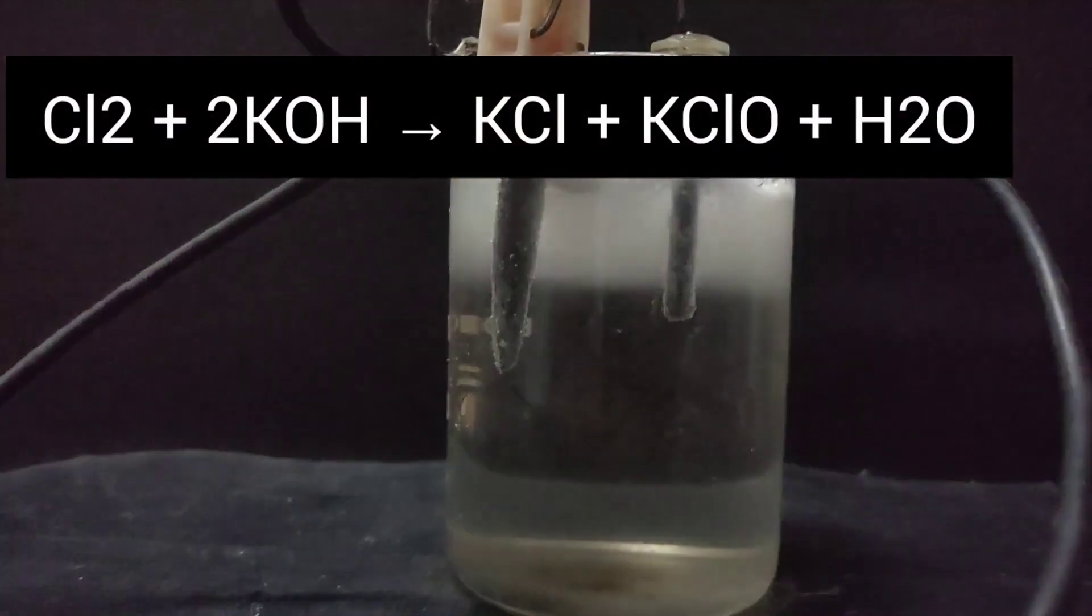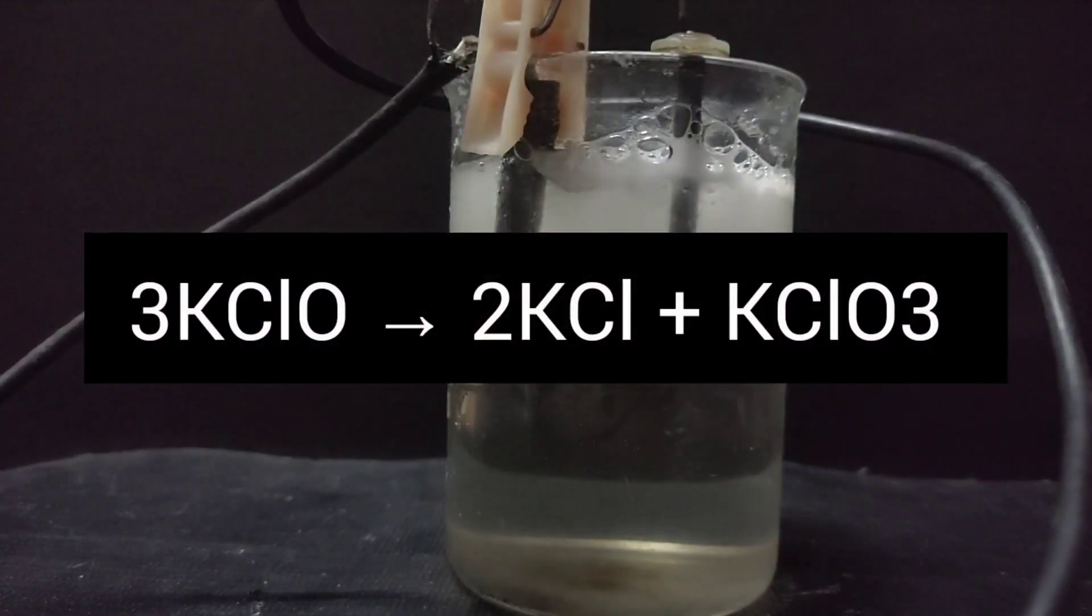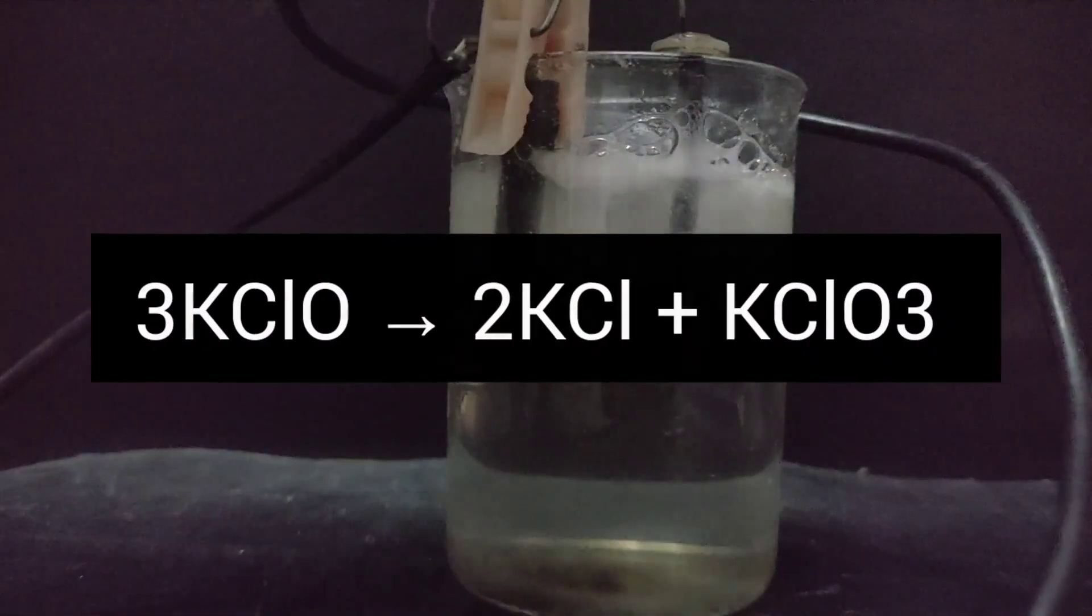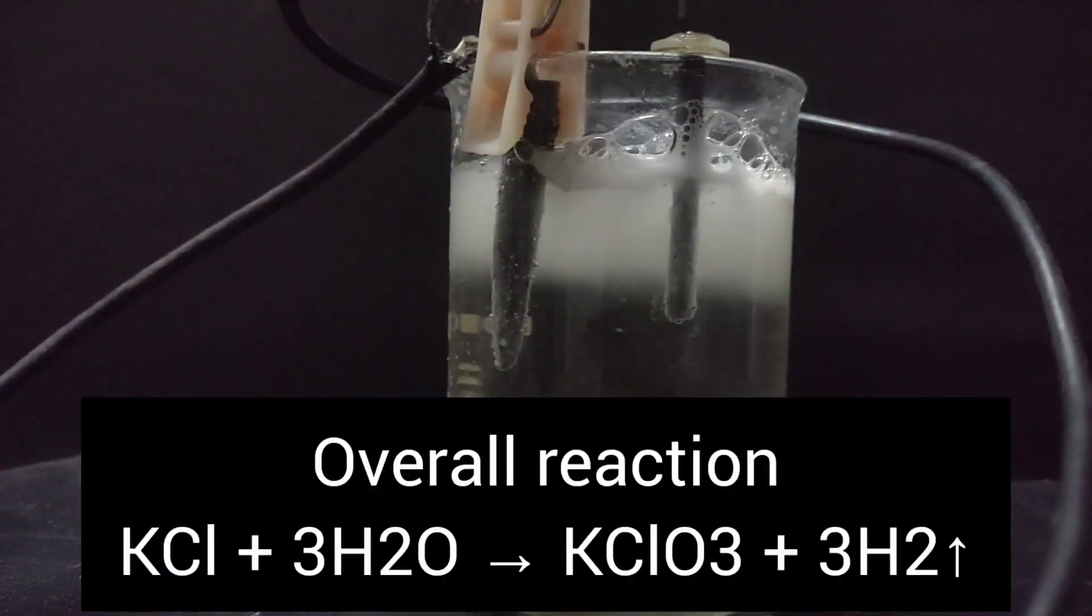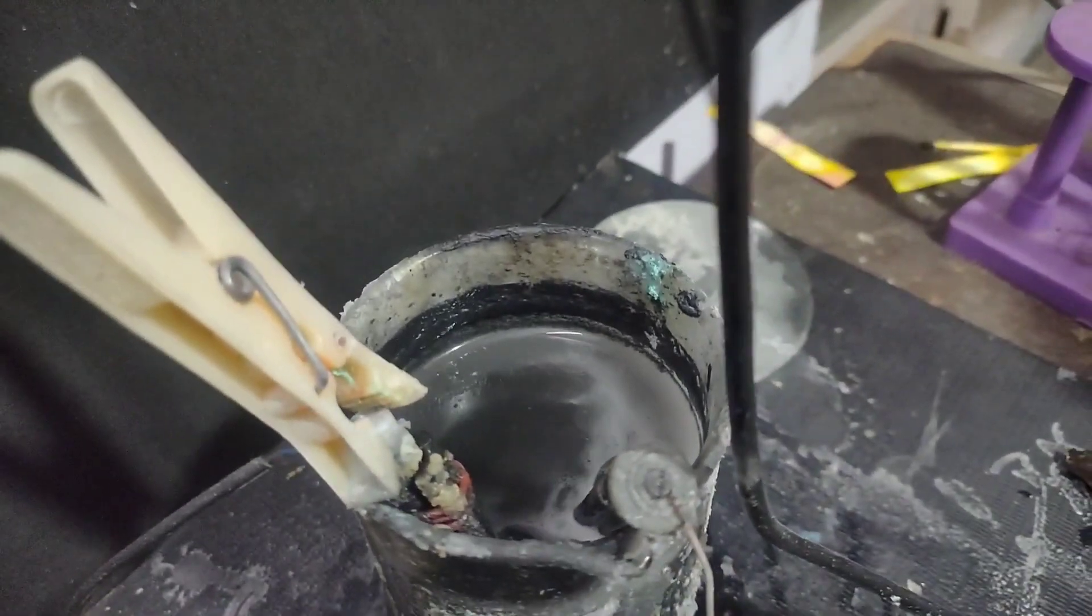The chlorine formed at the anode reacts with the potassium hydroxide in the solution, giving potassium hypochlorite. The potassium hypochlorite then disproportionates into potassium chlorate and potassium chloride. This process goes on and potassium chlorate is formed as a product which separates out from the solution due to its lower solubility in cold water and settles at the bottom.